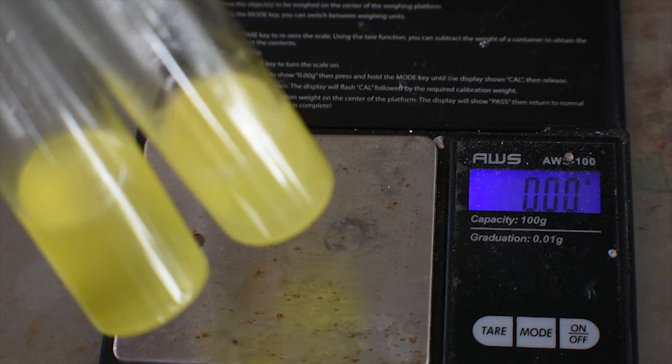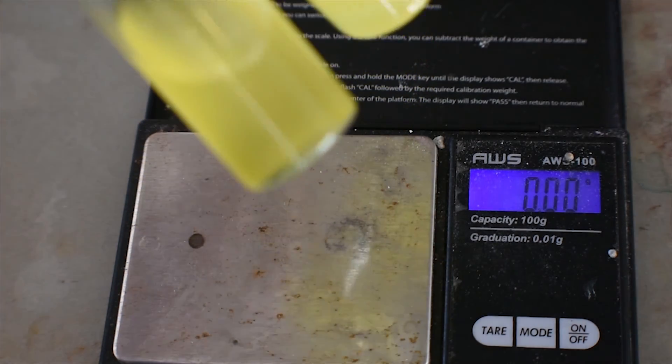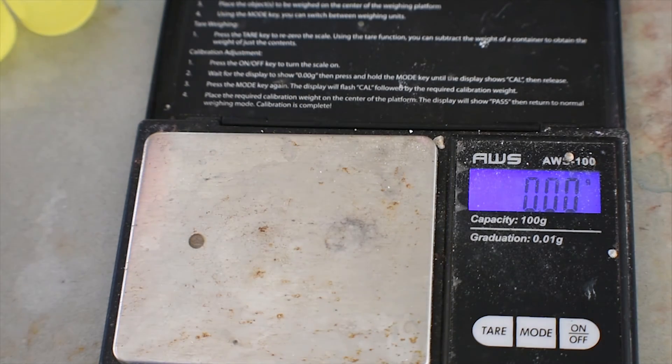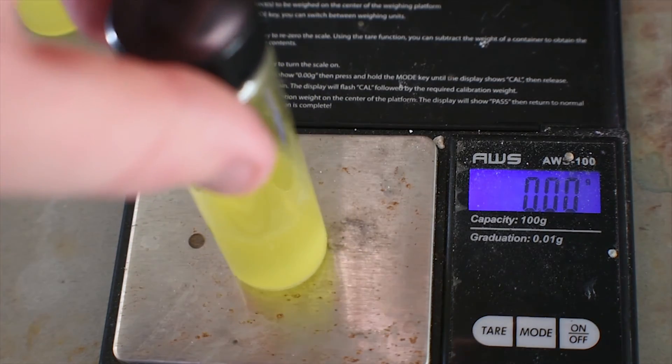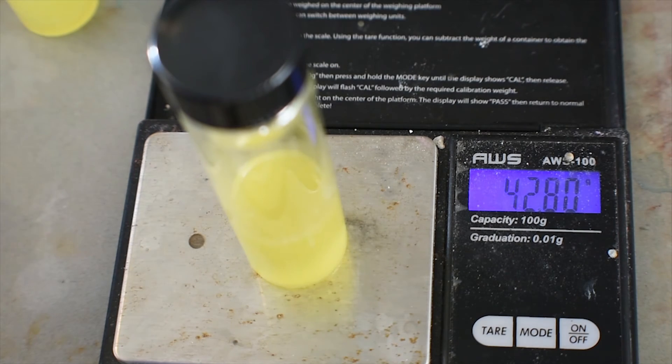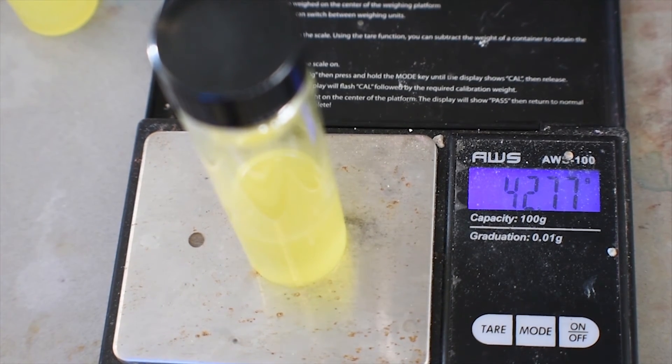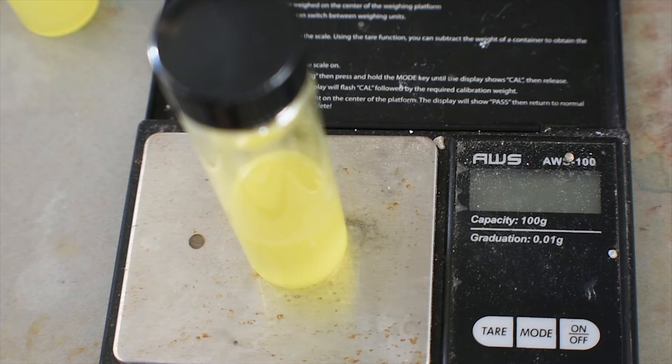25 grams overall from both my runs. I did this last night just to make sure it worked, and it really did. I don't know why this one weighs less actually. There's probably even more in there because I pipetted some in there this morning. Holy shit. Yeah, no, there's definitely a lot more in there. Okay, so that would be about 28.8 grams of this. Oh boy.